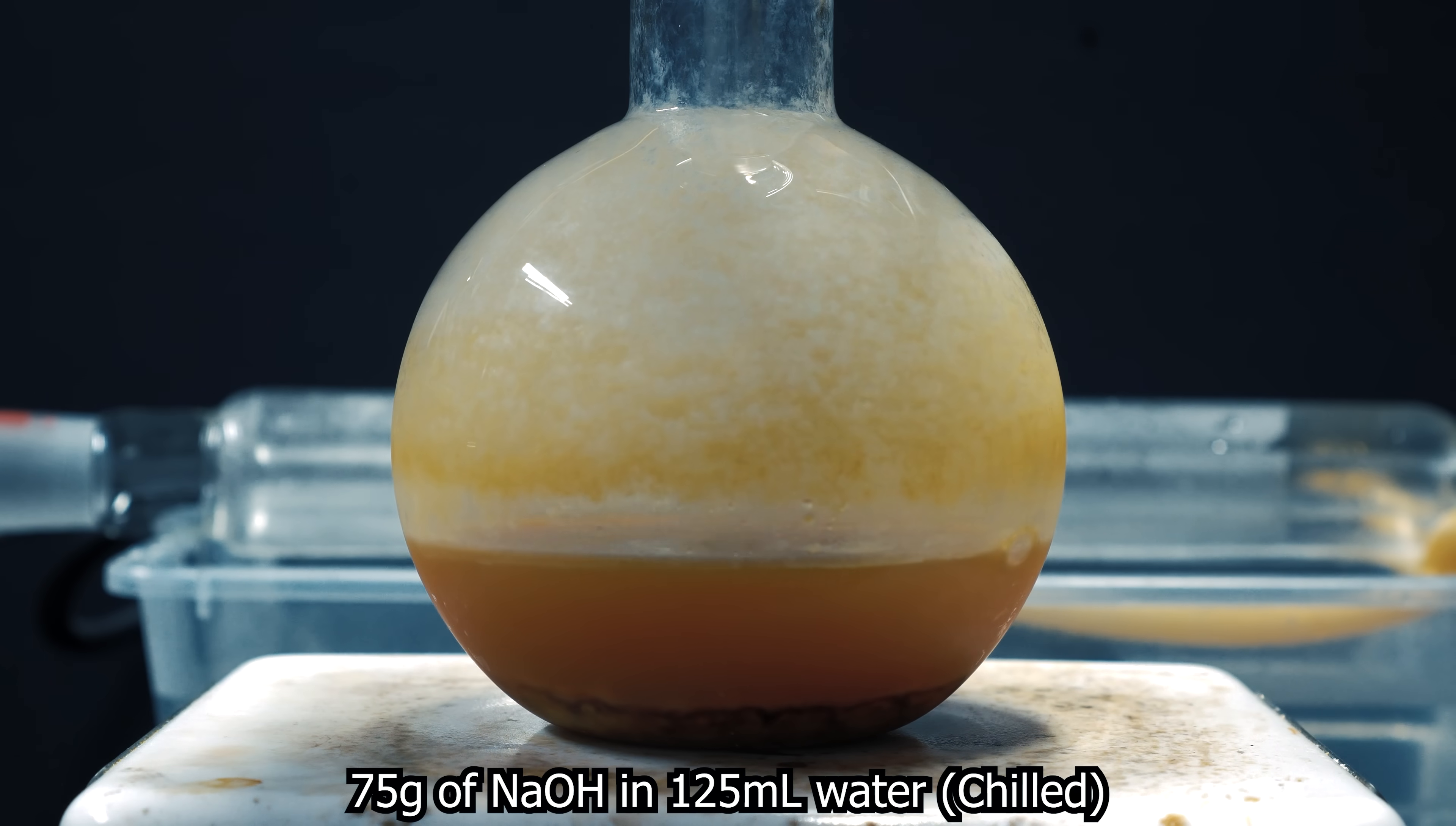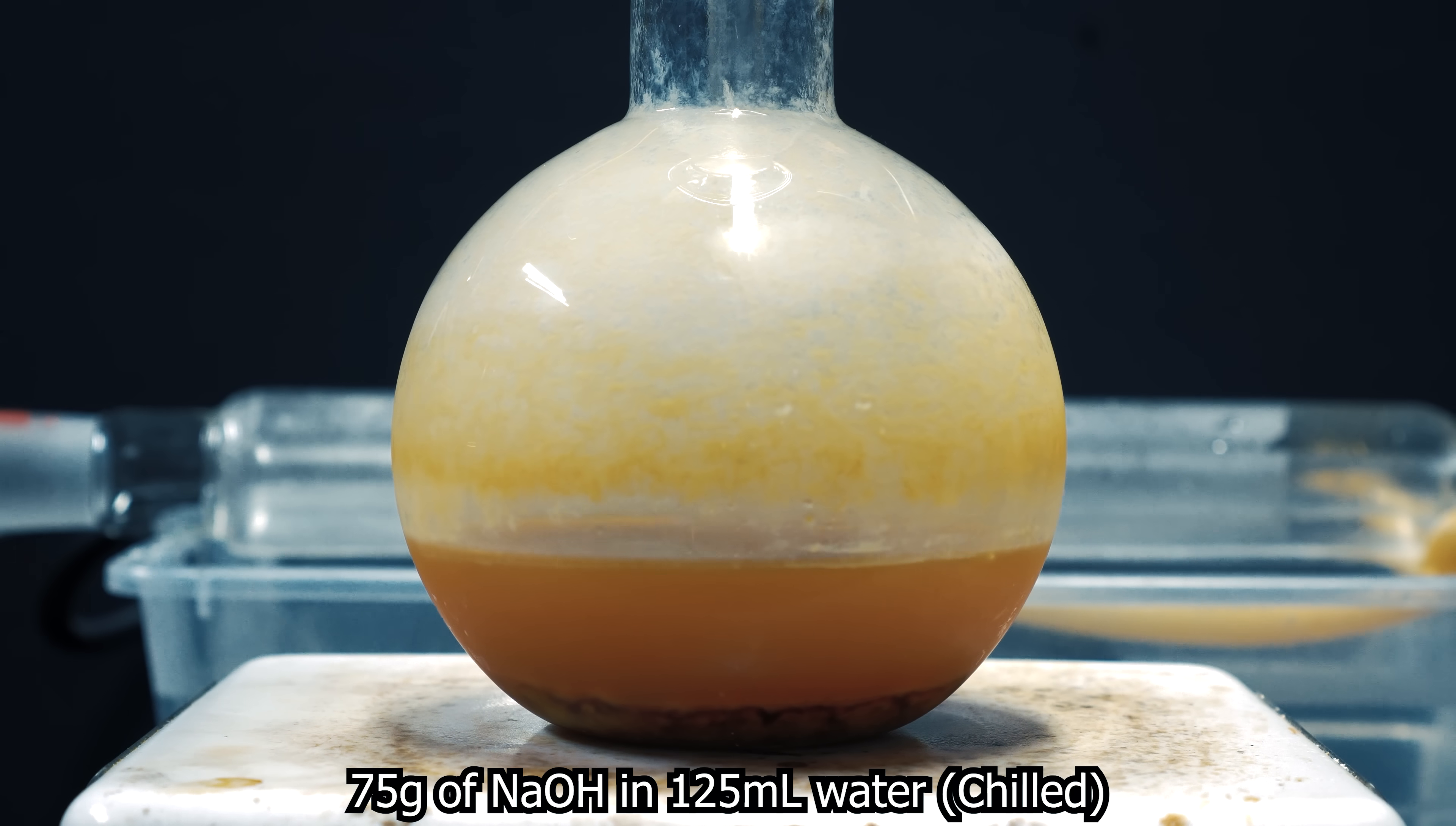I used a sodium hydroxide solution, and I slowly poured it in. I also had the solution in the freezer for about 30 minutes. As I poured the sodium hydroxide solution in, you can see tin hydroxide precipitate out of solution.